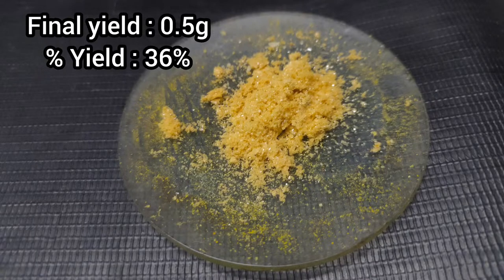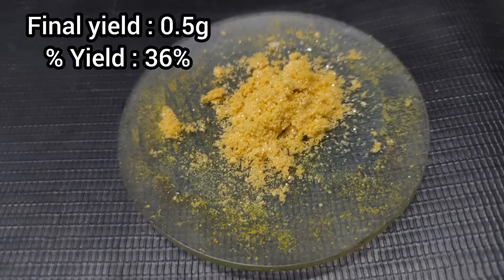After drying, yield came about to be 0.5 grams that corresponds to a percentage yield of 36%.